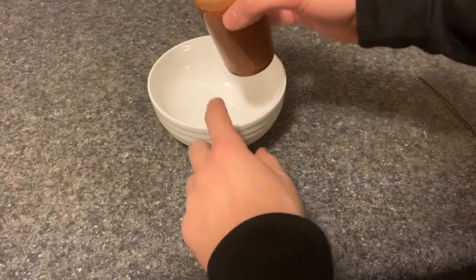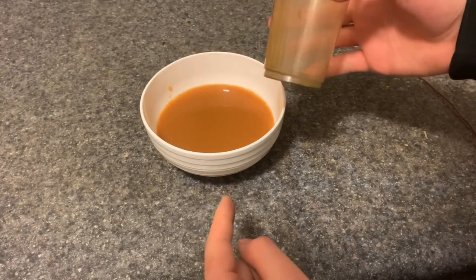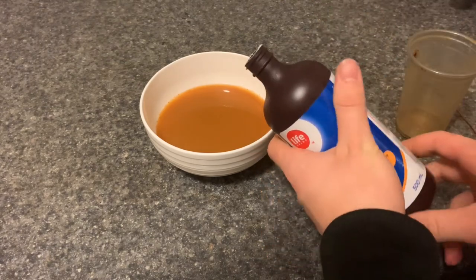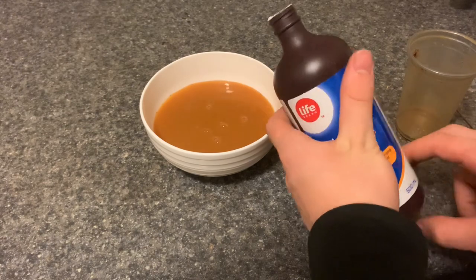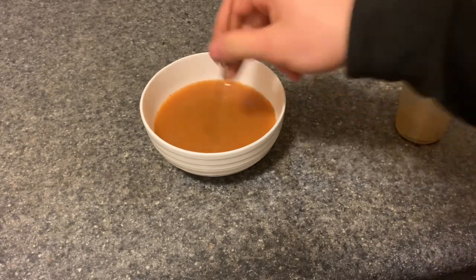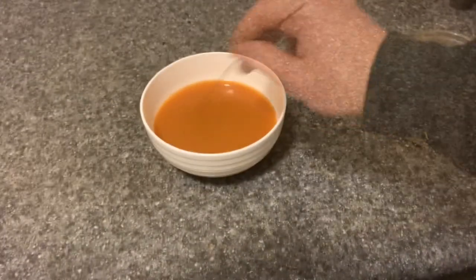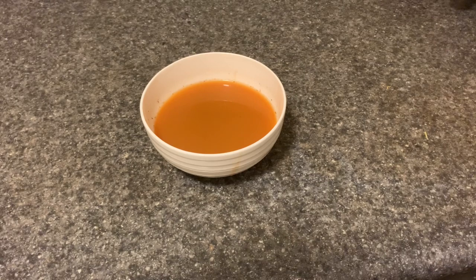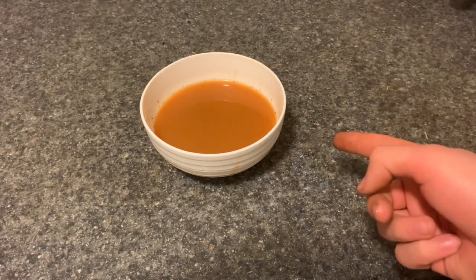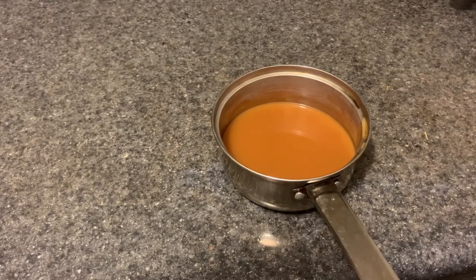Just pour this brownish mixture — it only looks visually repulsive, it's only rust. I'll pour all of it out and add quite a bit more hydrogen peroxide inside. I have no way of measuring the actual amount of iron-2-hydroxide inside right now, so just pour quite a bit of hydrogen peroxide inside and stir it up. It's going to become a much more orangey color — much less brown soon. The stuff inside is actually iron-hydroxide and iron-oxide, both of which are insoluble. If we wait a bit, all the iron-hydroxide will float and the iron-oxide will sink downwards, so there will be a layer of water in between, just like with the cup. It is also incredibly concentrated, giving it such a color.